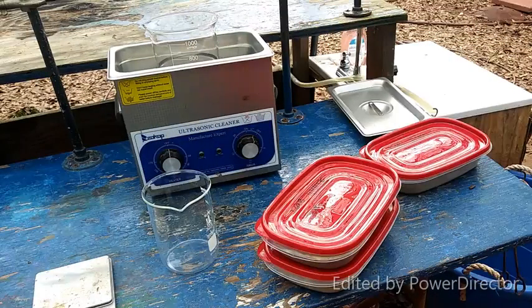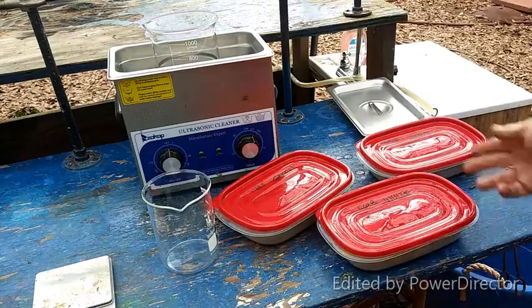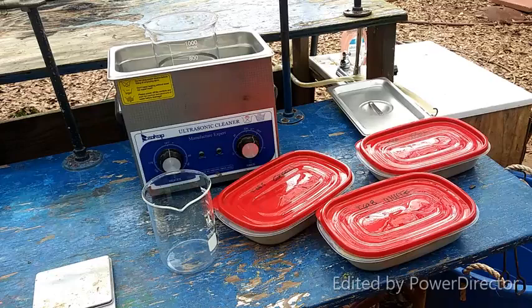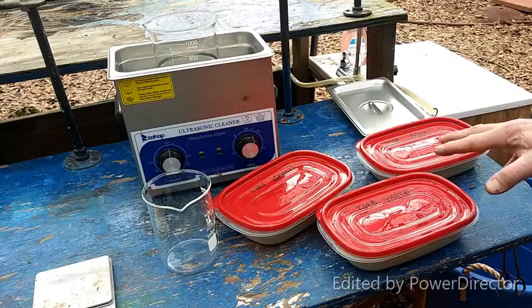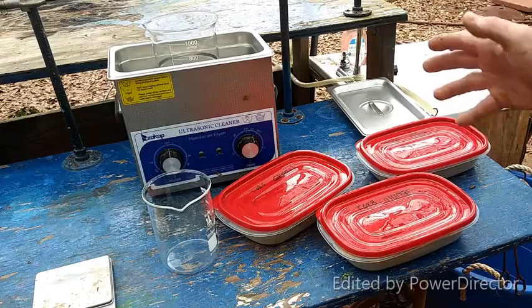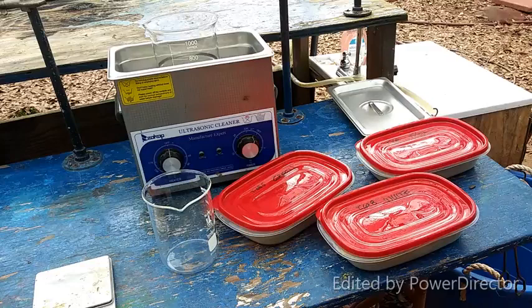Let's get on with it. I was given samples of three different kinds of kratom labeled red, white, and green. There are definitely different shades. I don't really know what these color names signify. What I was asked to do was create an extract from these samples so that the person asking can compare their extraction with mine and compare the results of the two.